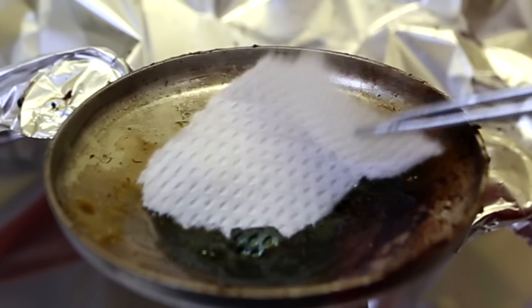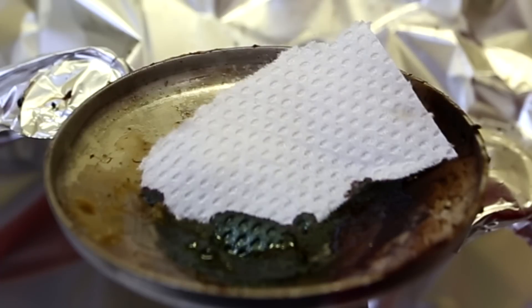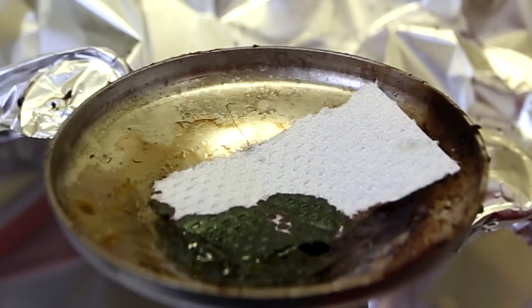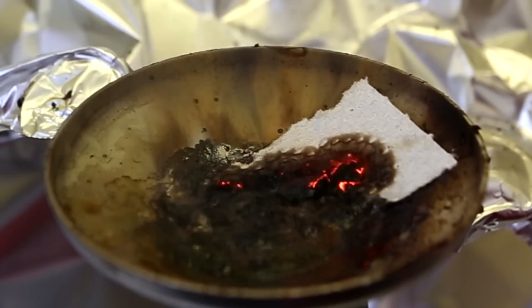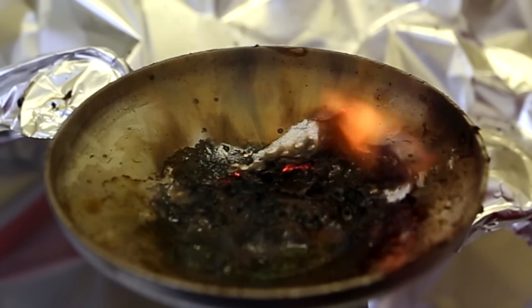This is just to show you that sometimes when the material is added to the manganese heptoxide, it does not ignite immediately. Sometimes it can take several seconds for the ignition to occur. It is best to leave it in weight instead of pulling away the now manganese heptoxide soaked material.